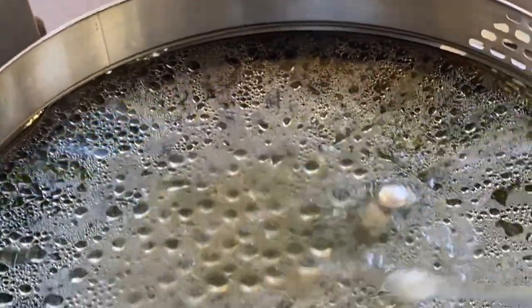As you can see now, the crystals are fully liquid. It's beginning to simmer a little bit. It's most likely any toluene or water being boiled off. And yeah, so that's about it for this. That's all you really got to do. You got to keep pushing it around and let all the water and toluene evaporate.